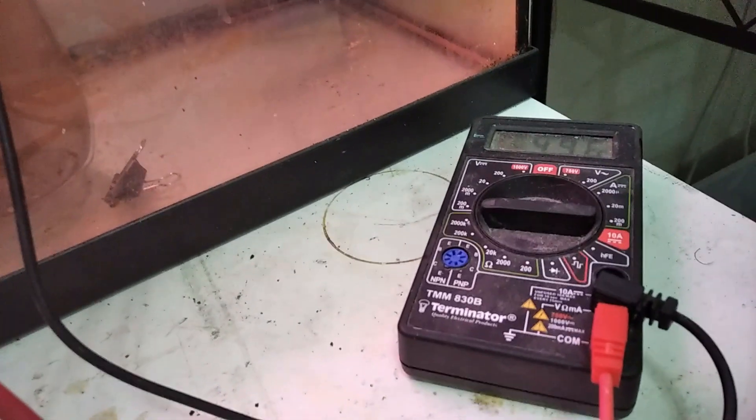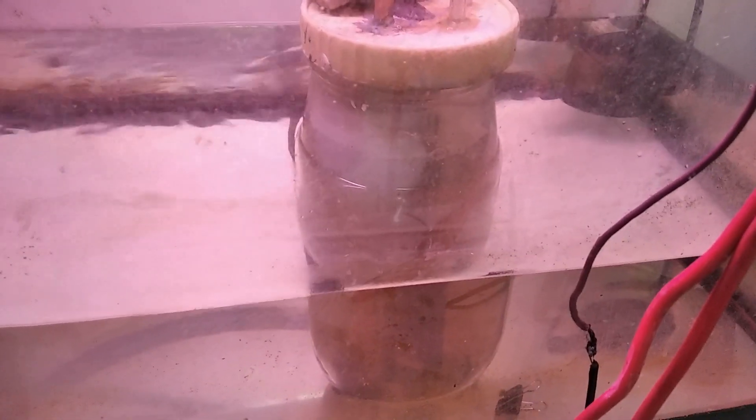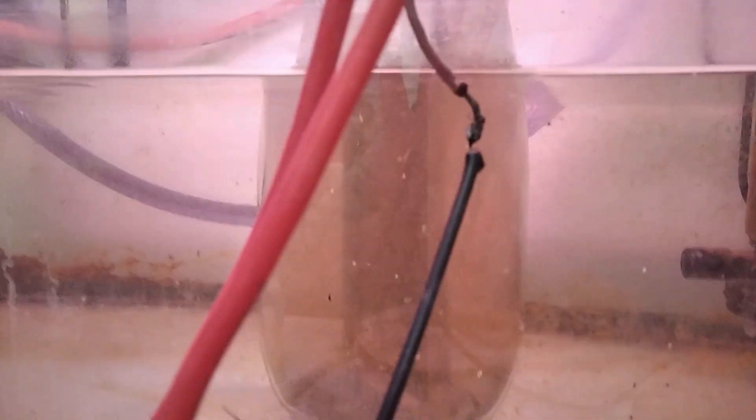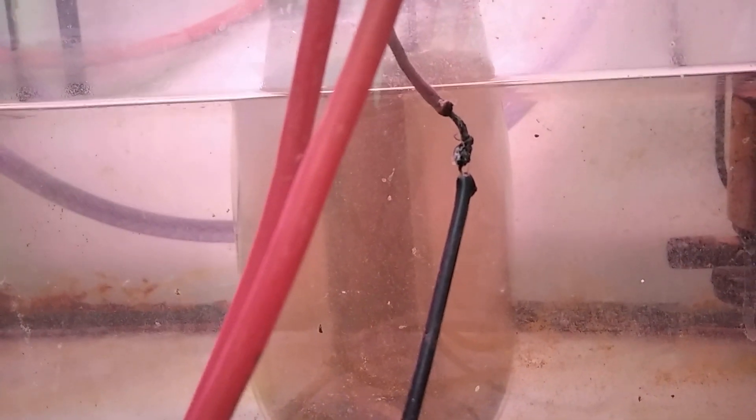It's been approximately two days. The cell is still running — it really takes long to convert the final tiny amount of chlorate, but I'm going to do it anyway. Might run this for three or four days just because. The water doesn't look so bad and there's nothing on the floor of the tank. It normally does become this brownish thing from micro-erosion at the later stages, but since these electrodes are easy to plate, I don't give a crap.